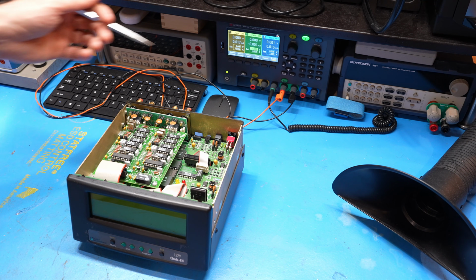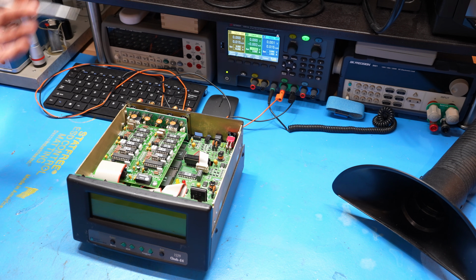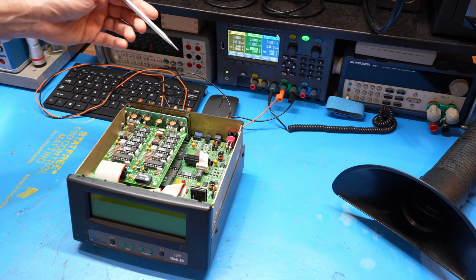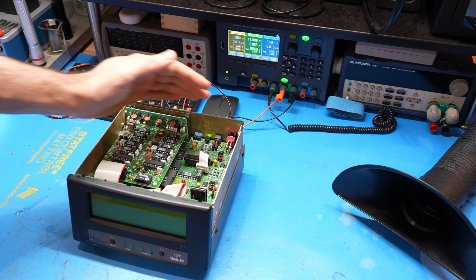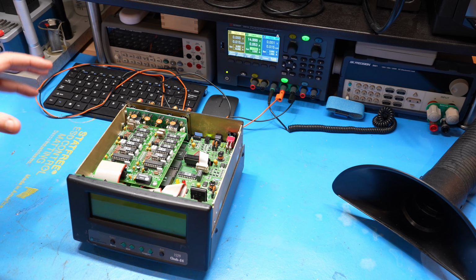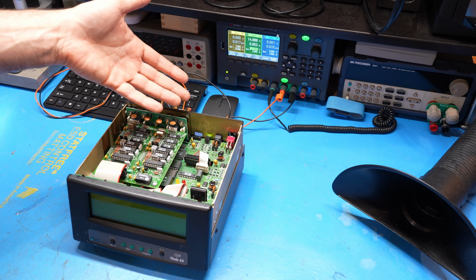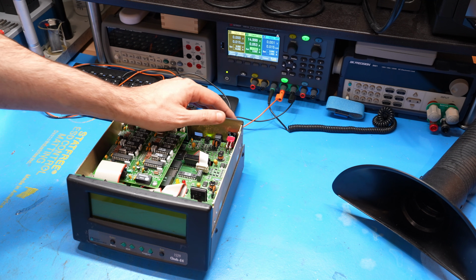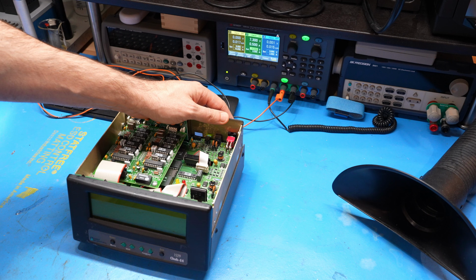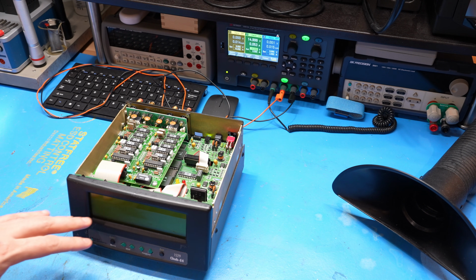All right, so I have a current limited power supply over here, 15 volts. I'm limiting it to half an amp just to make sure I don't do any other damage to this. Connecting in the back, if I'm going to enable that, there you go. If you look, you can see that the charge light does indeed turn on. So something is receiving power and some regulation is happening for charging the battery. There's nothing in there, of course, so it's just sitting open circuit. But look what happens when I turn it on. As soon as I try to turn it on, you can see it immediately jumps to current limiting and it goes to 7 volts and nothing shows up on the display.